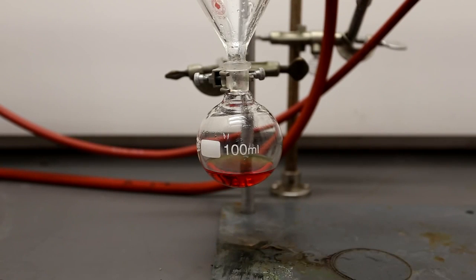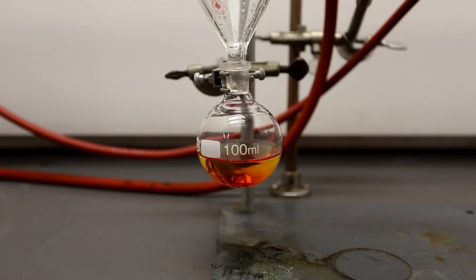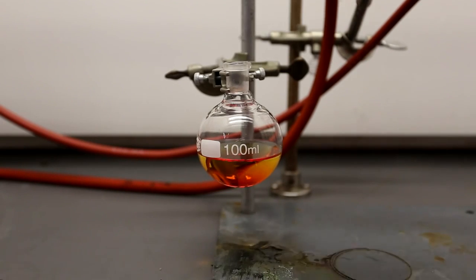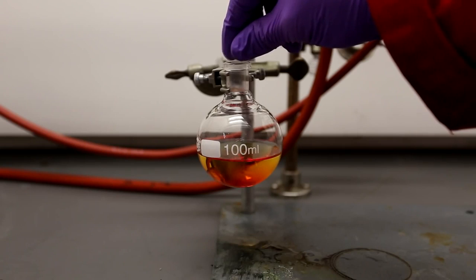After the distillation, the dilute hydriodic acid in the trap was added to the collecting flask. Then, a few boiling stones were added.